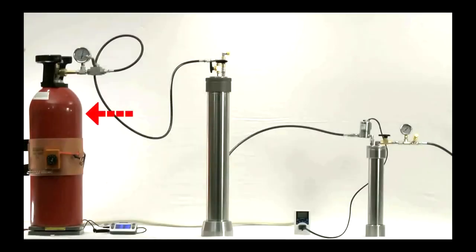This is the 20 pound aluminum supply tank. It has a dip tube to pull liquid CO2 from the bottom. There is a pressure gauge and an isolation valve.